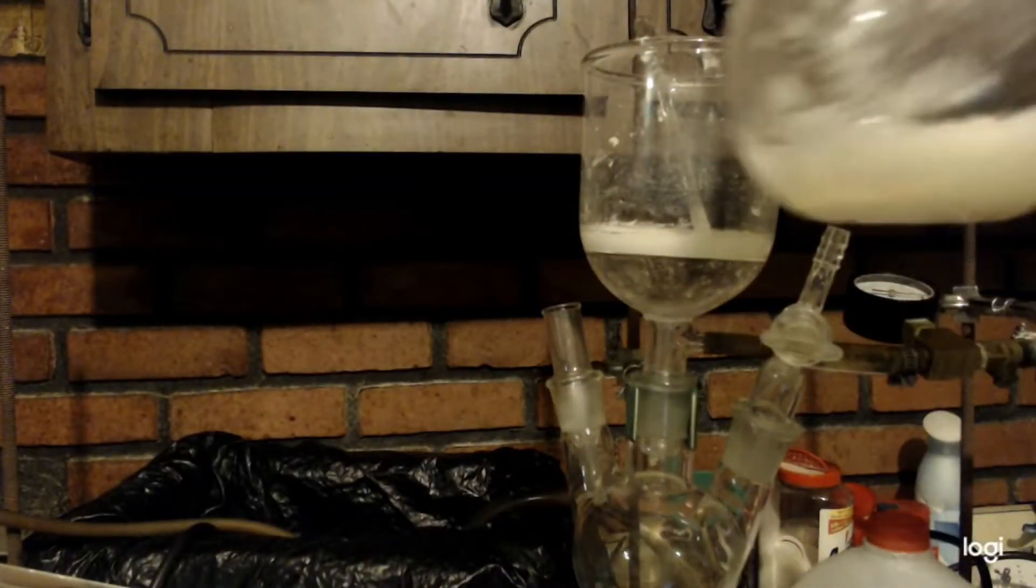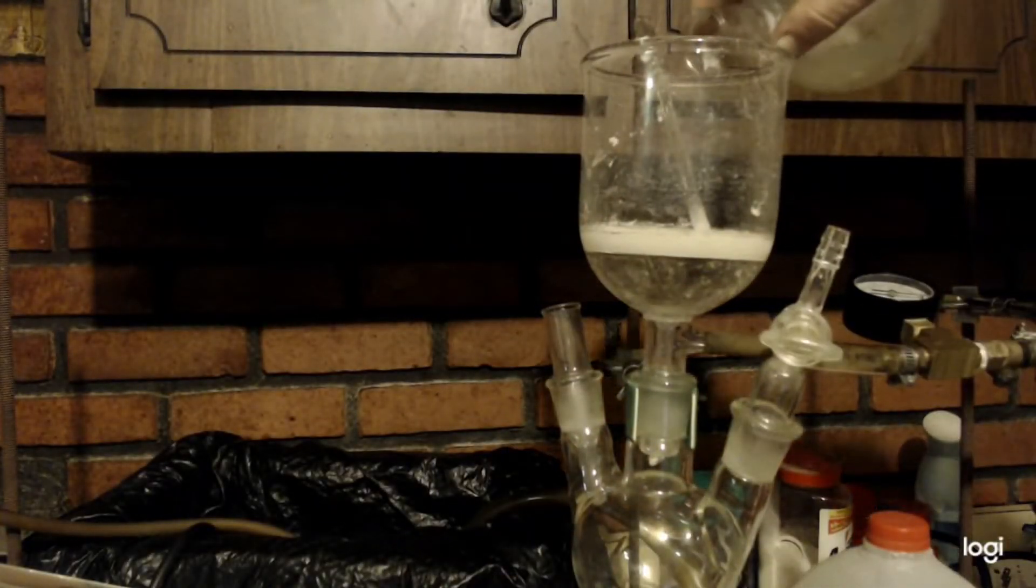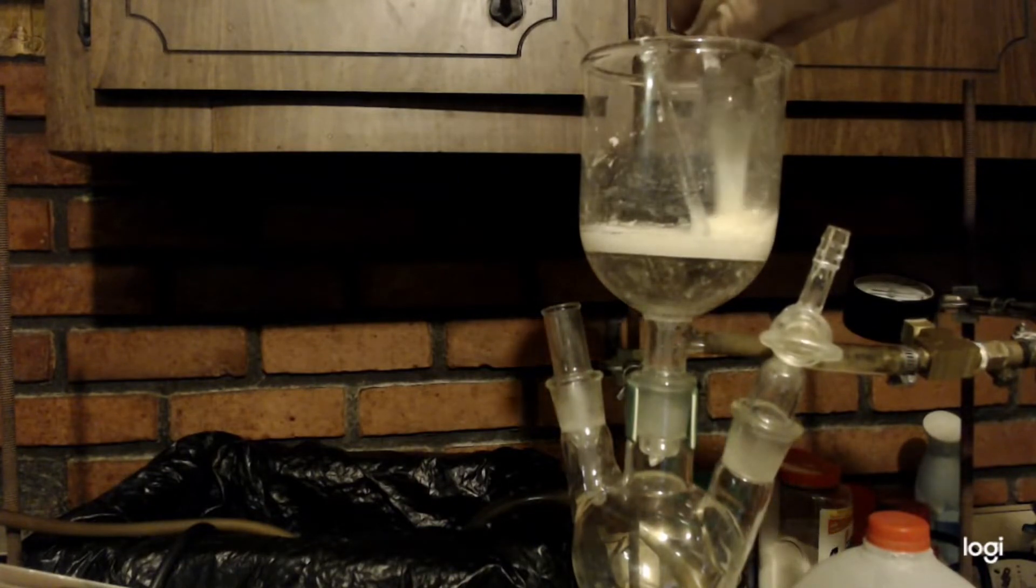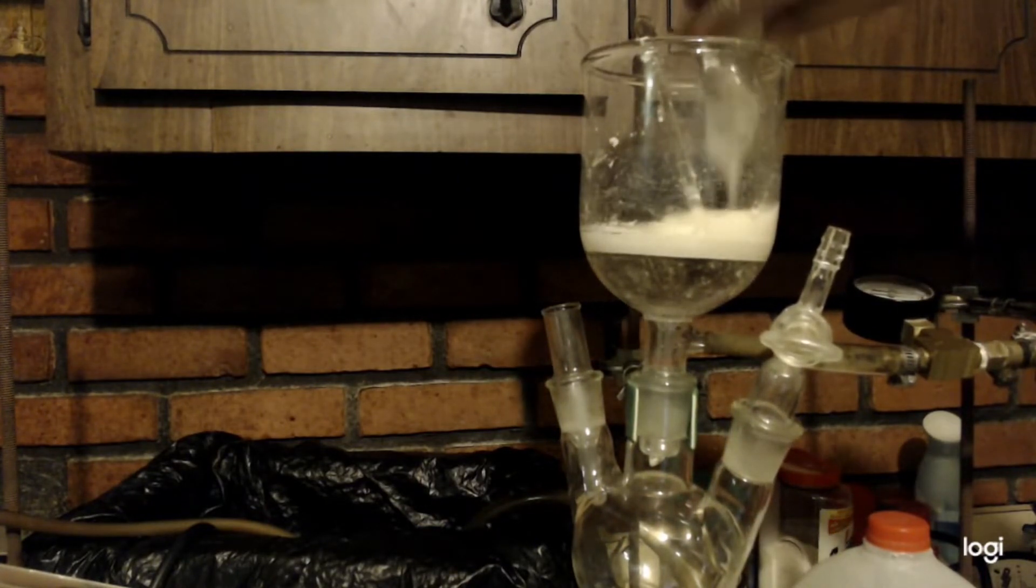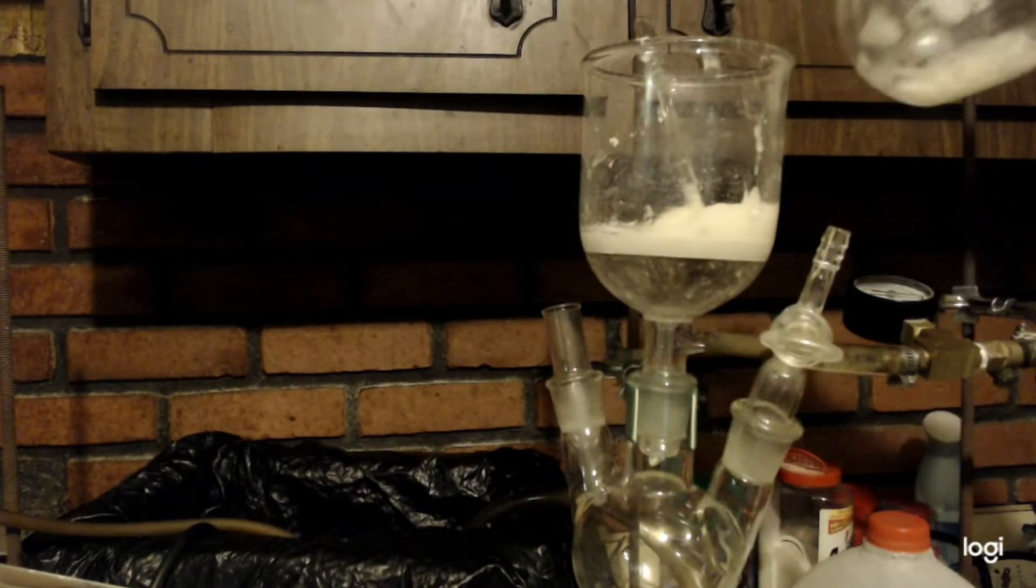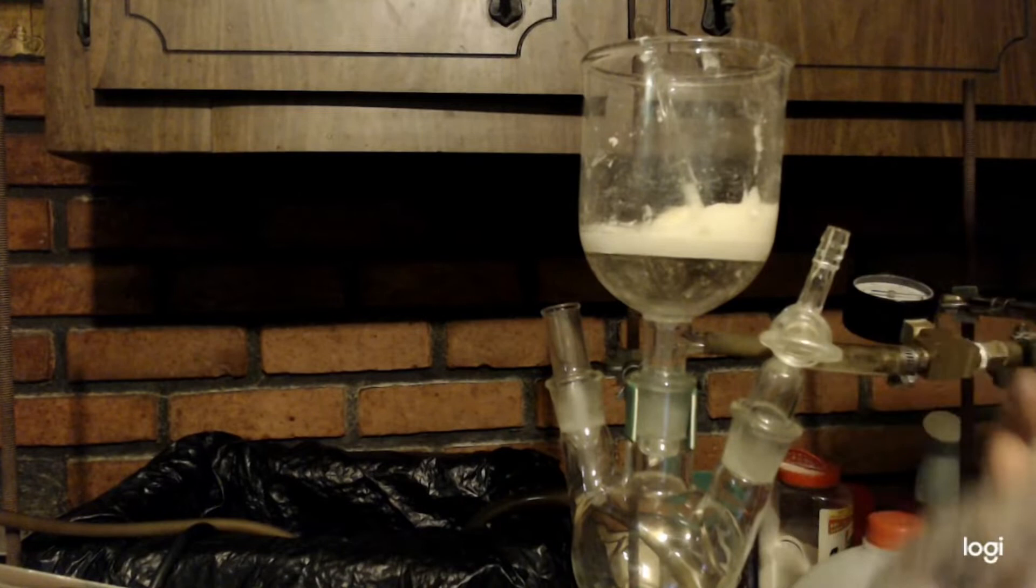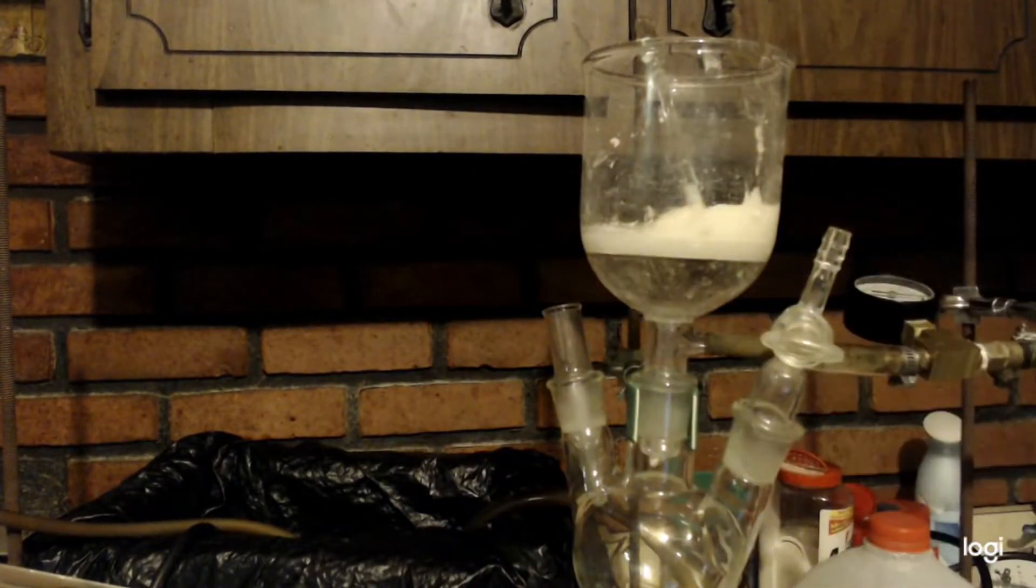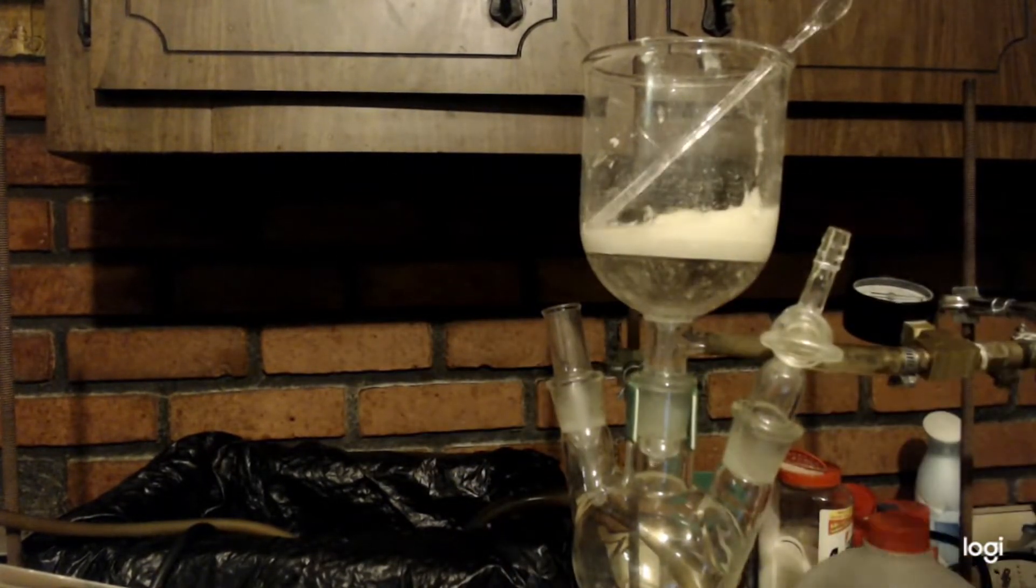Alright, so it's been sitting here for about 5 minutes. I'm going to put a couple mils in there just to clean that out a little bit.